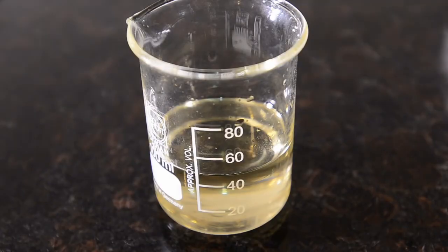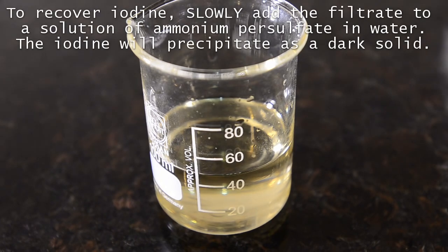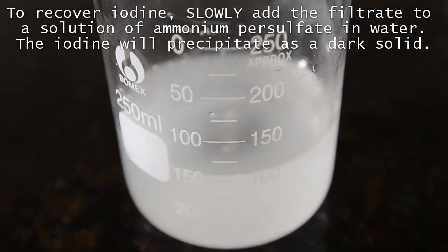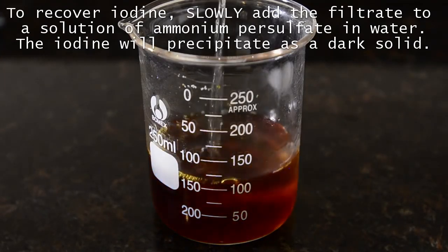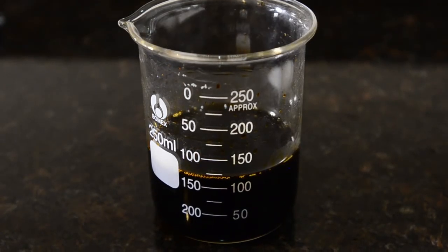To recover the iodine is very simple. Take the yellow aqueous layer from the DCM extraction we did. Now make up a solution of ammonium persulfate in water. Use an equal molar amount to the starting iodine. Now add the aqueous solution from the reaction to this. The iodide in the solution will be oxidized to solid iodine, which can be filtered off. Check out our other video for full information on this.